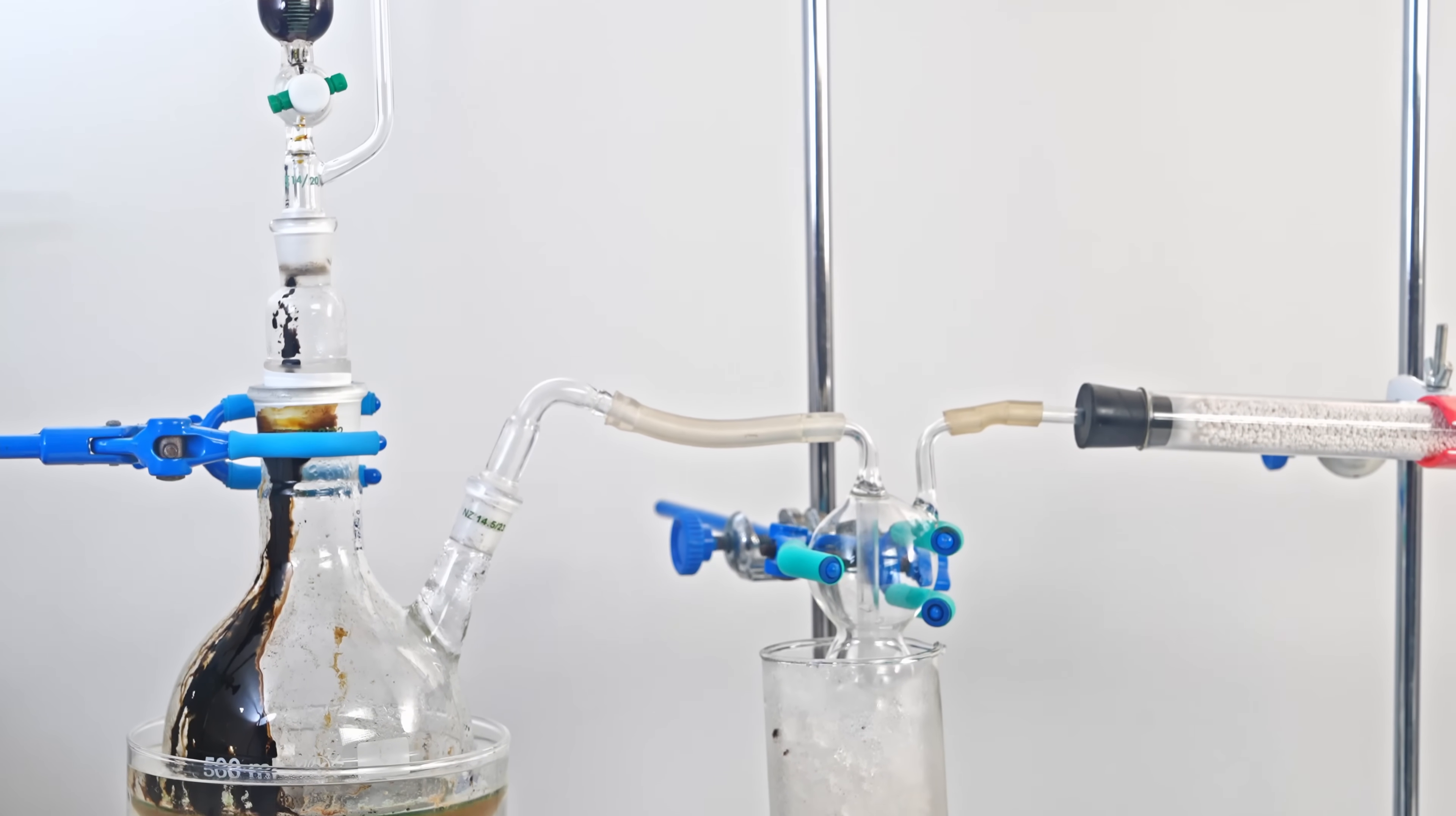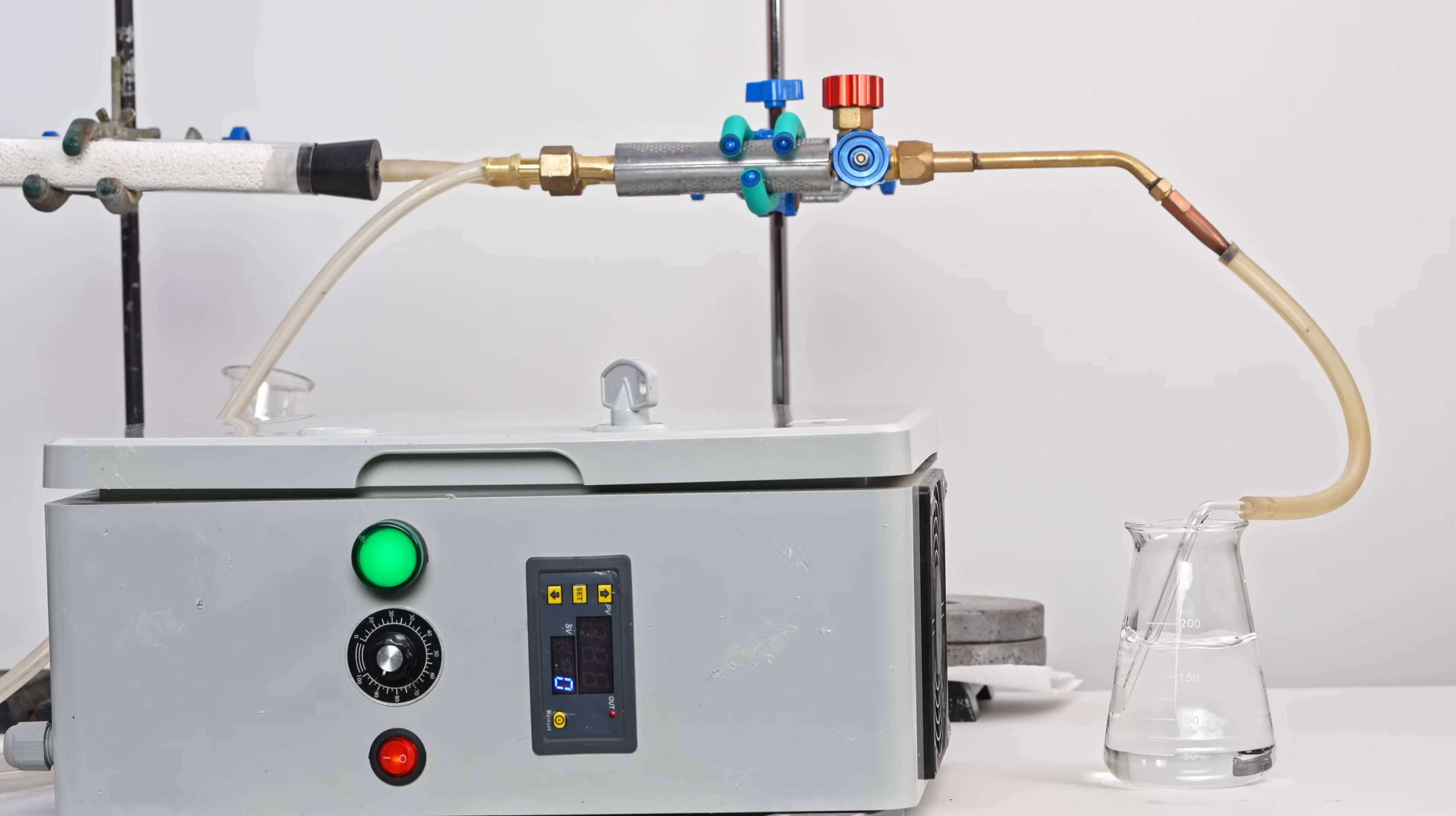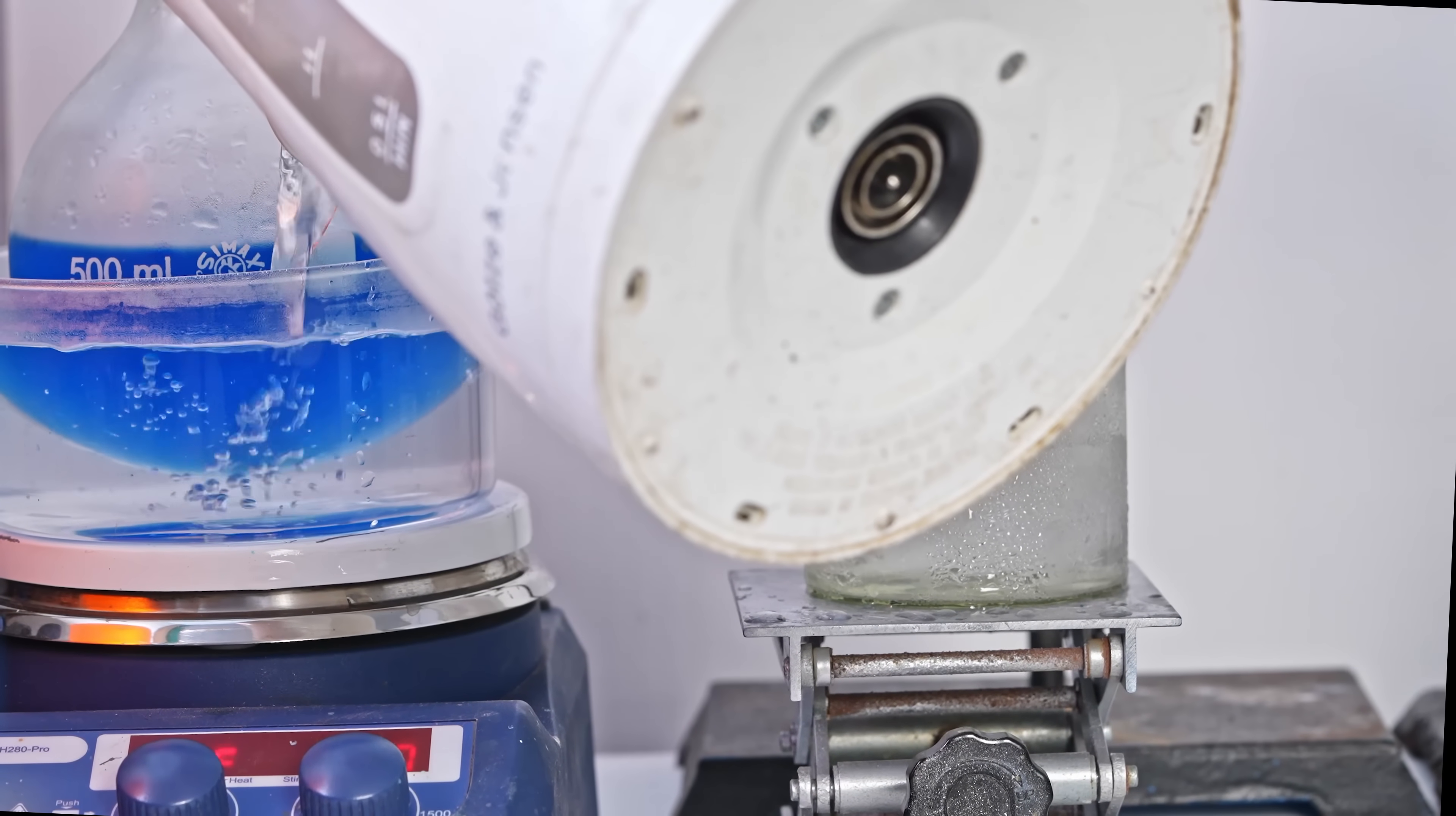To do this, I had to reassemble the setup again. I also connected my ozone machine to the setup, so that the cyanogen would immediately come into contact with the ozonated oxygen resulting in a higher temperature. However, the ozone flow does not yet enter the autogenous torch. First, we will try to ignite only the cyanogen, not the mixture. This time, I placed the copper sulfate solution in a water bath to increase the reaction rate.